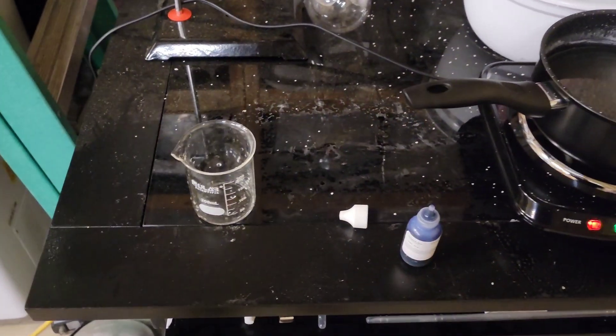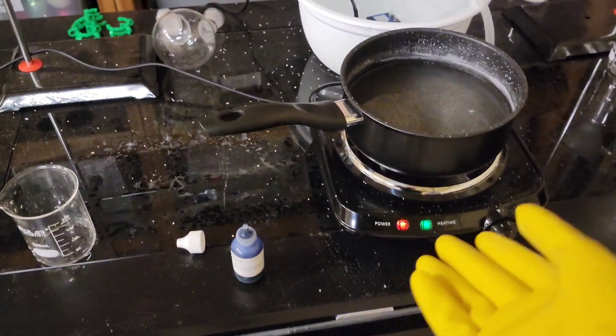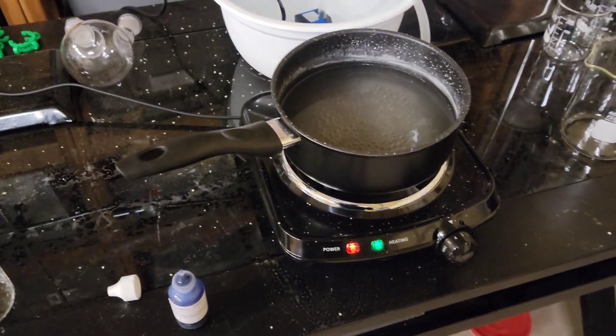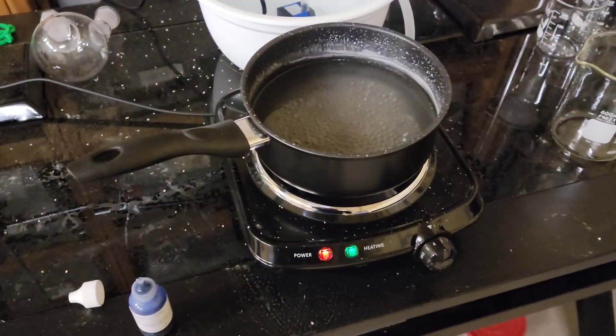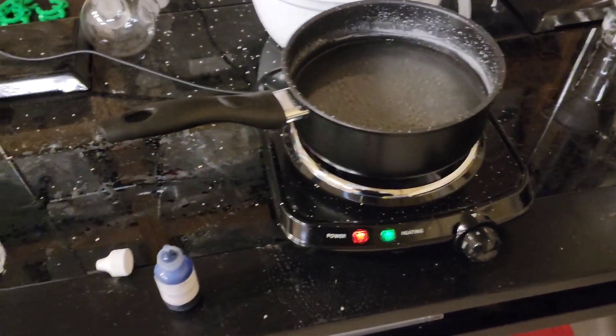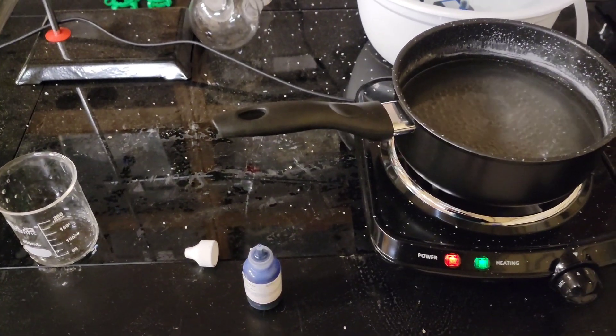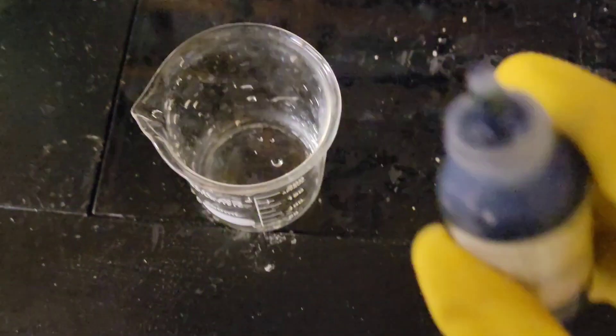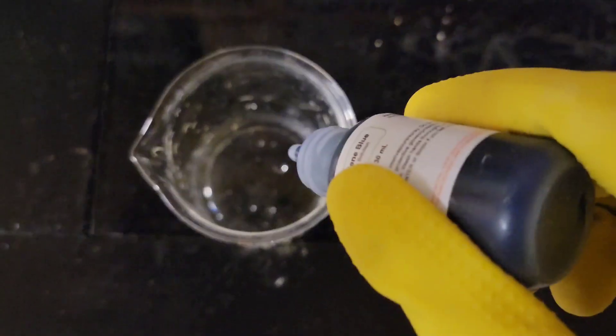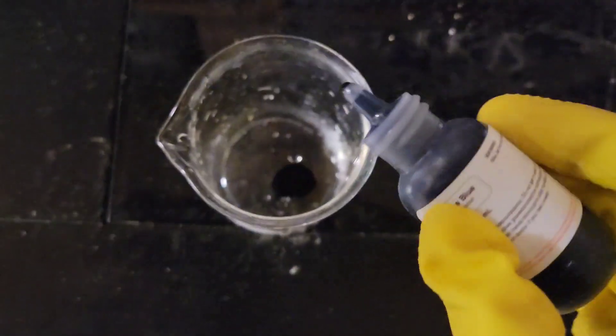All right, so for the test there's gonna drip in here. Over here I've got another couple batches of sodium chlorate all dissolved. I'm gonna purify those in addition to this one so we can make a big batch of sodium perchlorate. Let's just go ahead on with this one. I'm just gonna take one drop, put it in. Oh, it's not focusing.